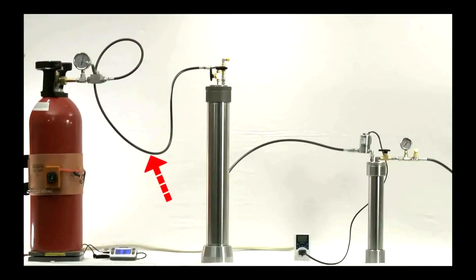The supply line delivers the CO2 to the extractor filled with raw material. The CO2 dissolves the extract and delivers it through this line to this valve. The extraction flow rate is determined by this valve.